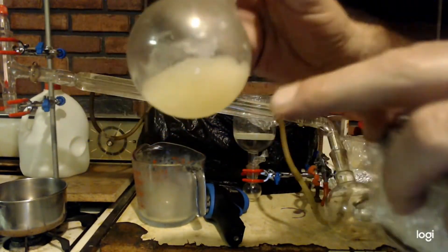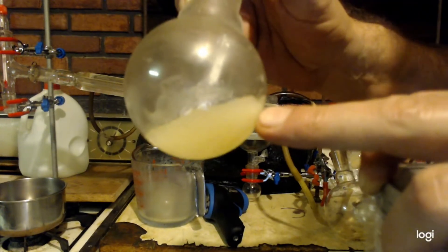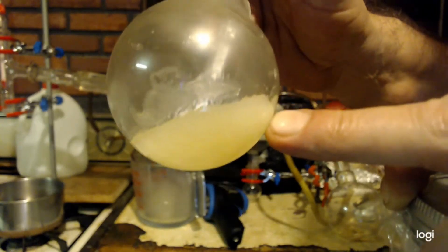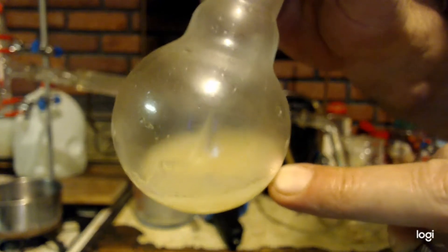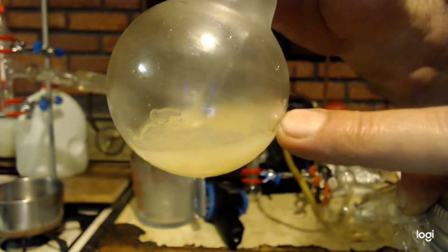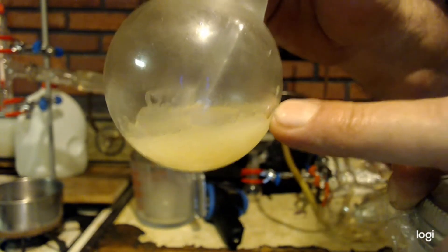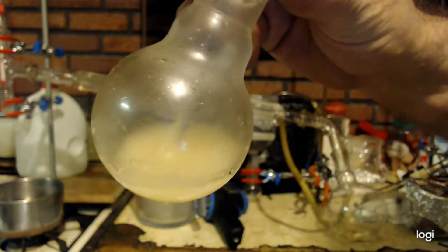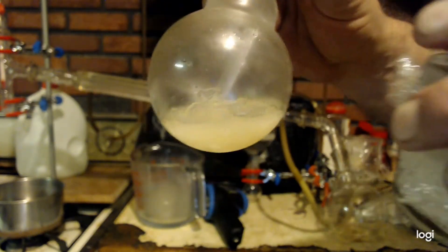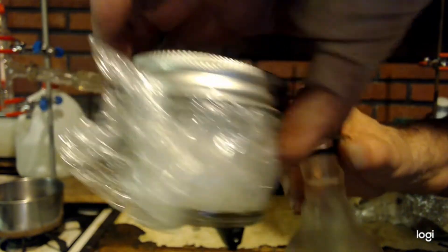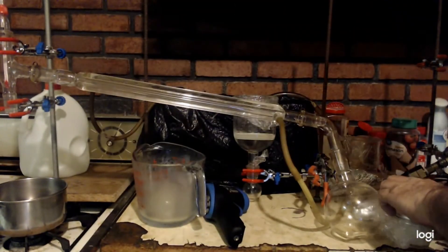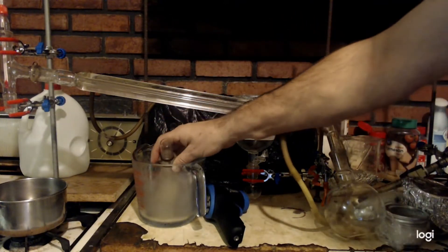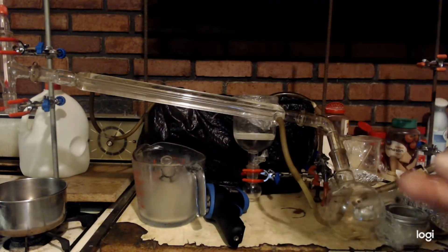What I might also do is see if this can melt down a little bit, and when I filter it, it'll be nice and white. If I do that, I'll put it with these crystals here. Anyways, I've been doing this for a week now making this stuff - it should have taken a day. So I think I'm done. I am proud of my yield, especially with all my failures that have been happening.